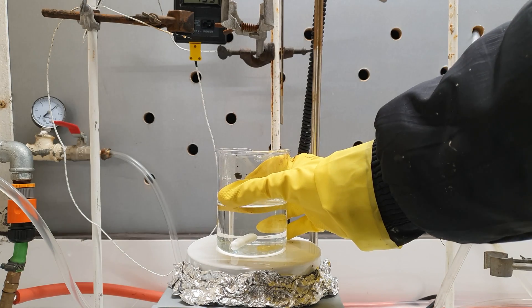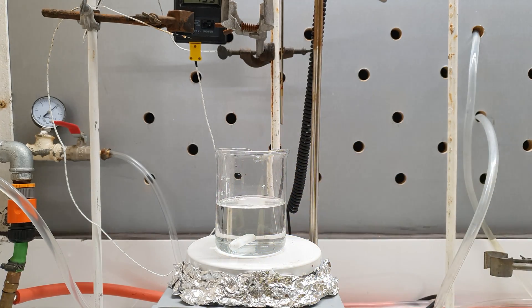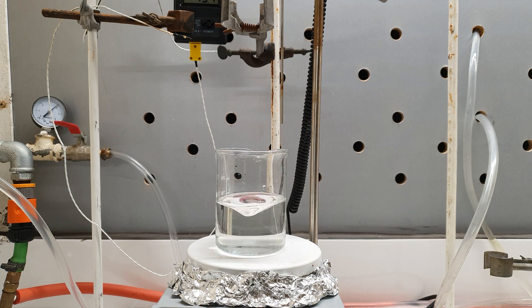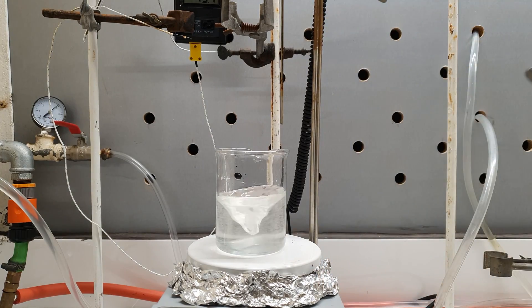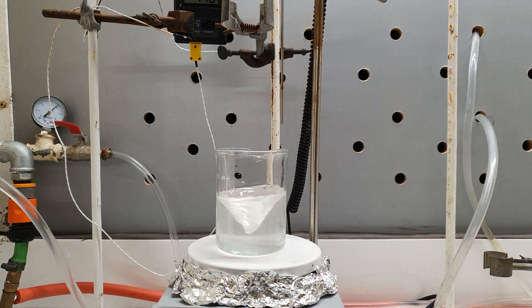The lower layer was drained in an Erlenmeyer flask and the upper water layer was placed in a beaker. Nitromethane is slightly soluble in water, so the water layer still contains some of it that can be recovered. To do this, I added sodium chloride to it until no more dissolved.